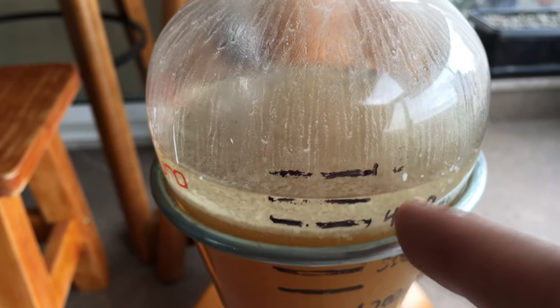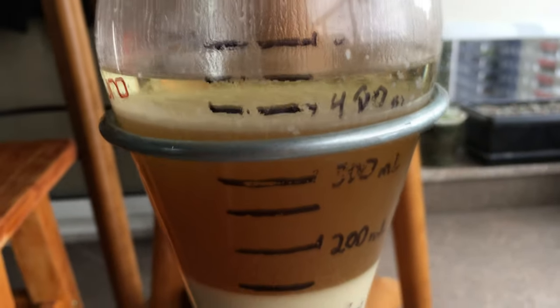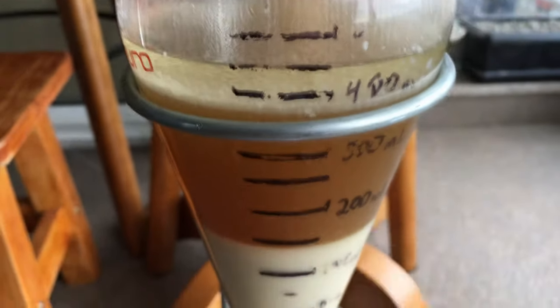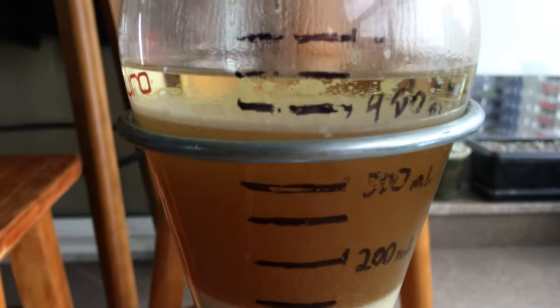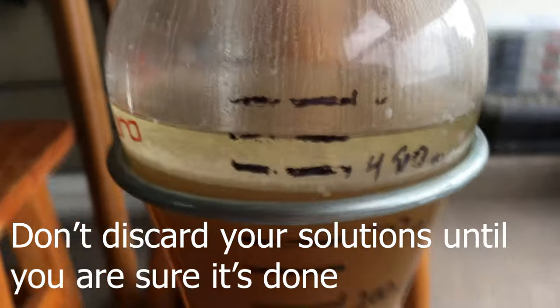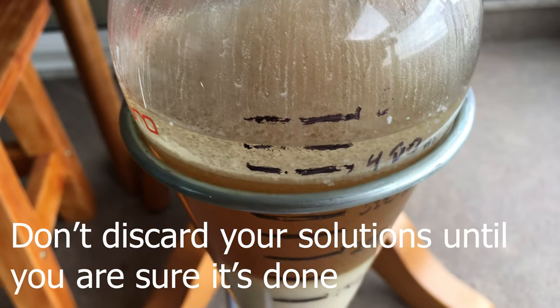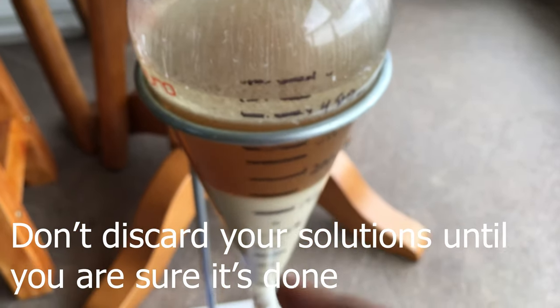I could discard my aqueous solution. I'm just doing a second pull and I'll salt and see how it goes. For anyone that doesn't know what I'm doing, this is a new extraction that I'm doing.